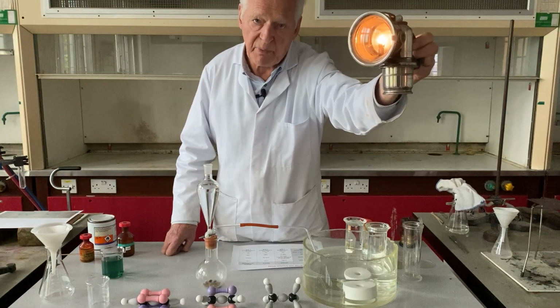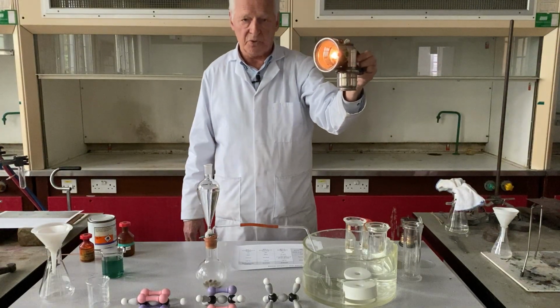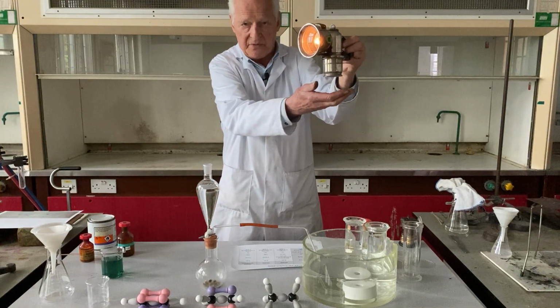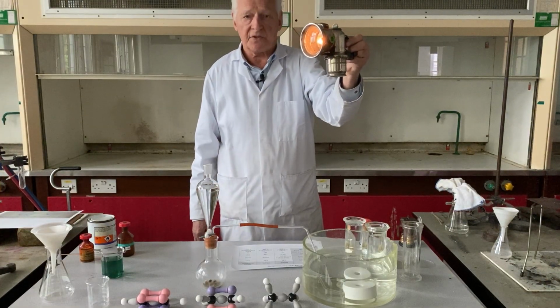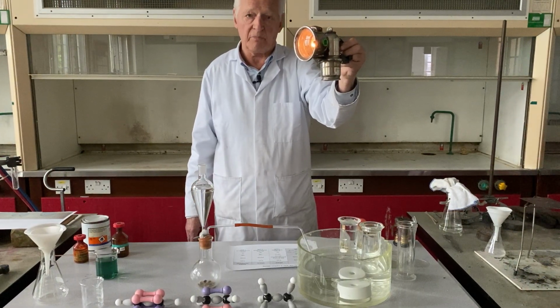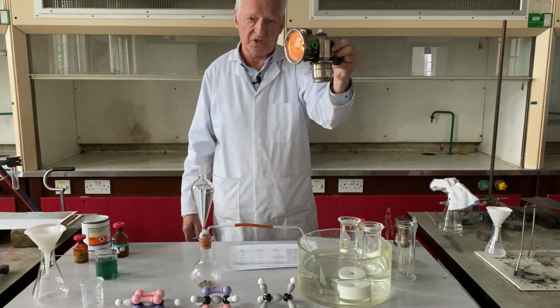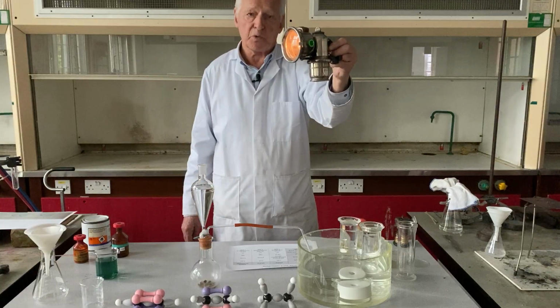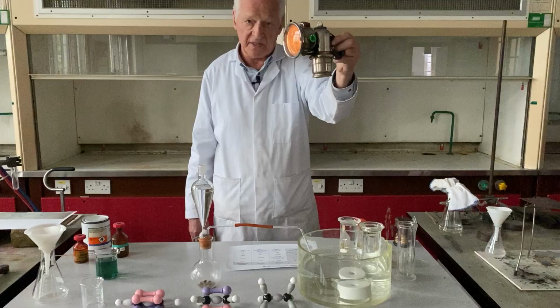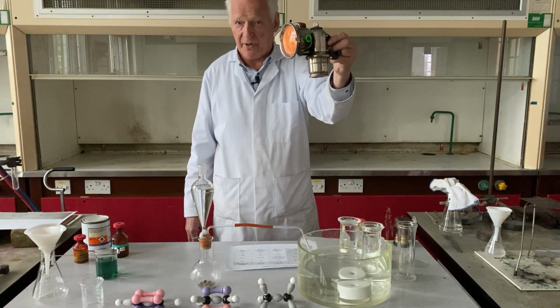Well, the flame which is burning in there, which you can see quite clearly, is actually caused by a gas which is burning. The gas is generated from inside this container at the bottom down there, inside the lamp, and the gas is called acetylene. Today, I'm going to talk quite a little bit about acetylene and its chemistry, and also its importance, how it was discovered, and hopefully this will put you a little bit more into the picture to appreciate this splendid gas, which is still a major industrial chemical today.